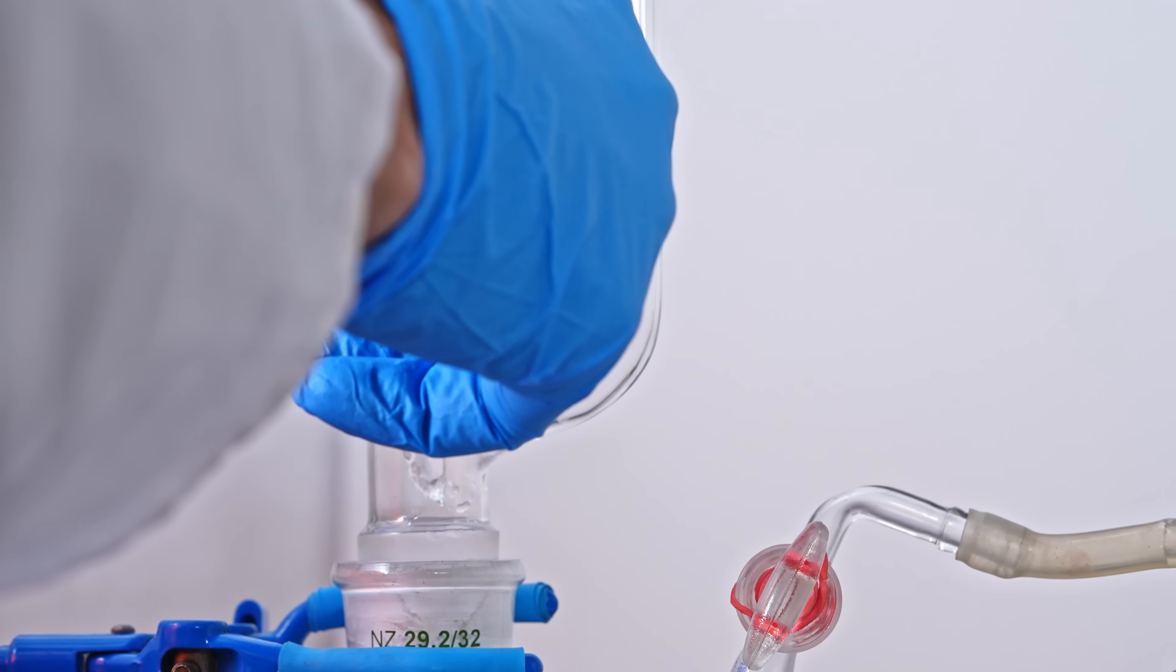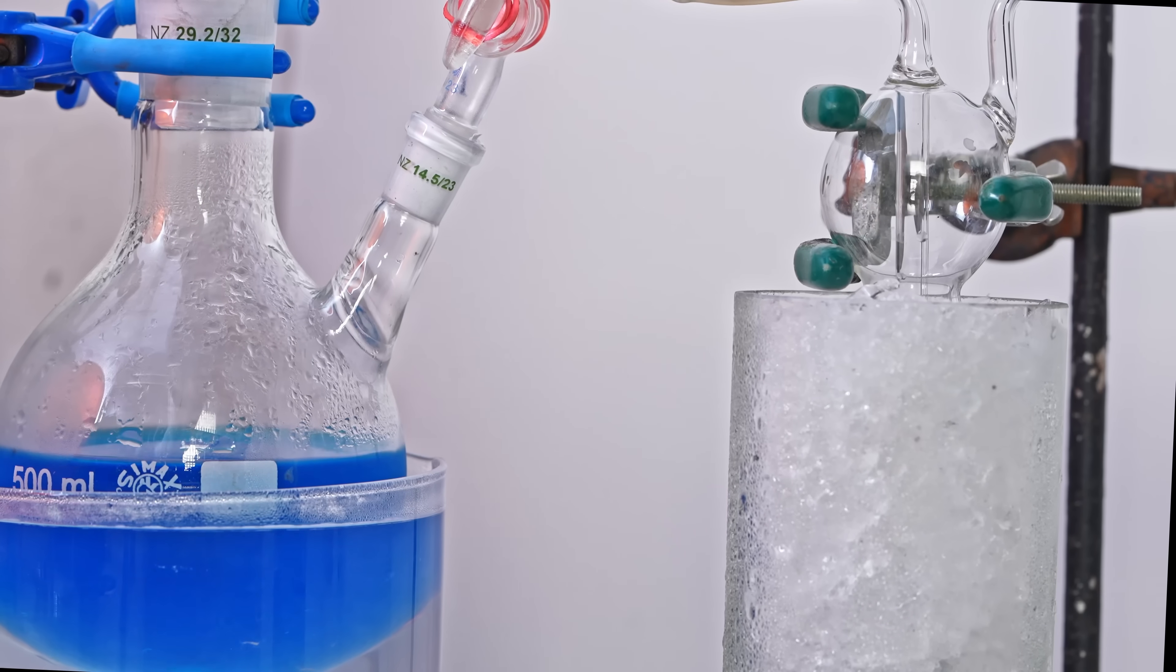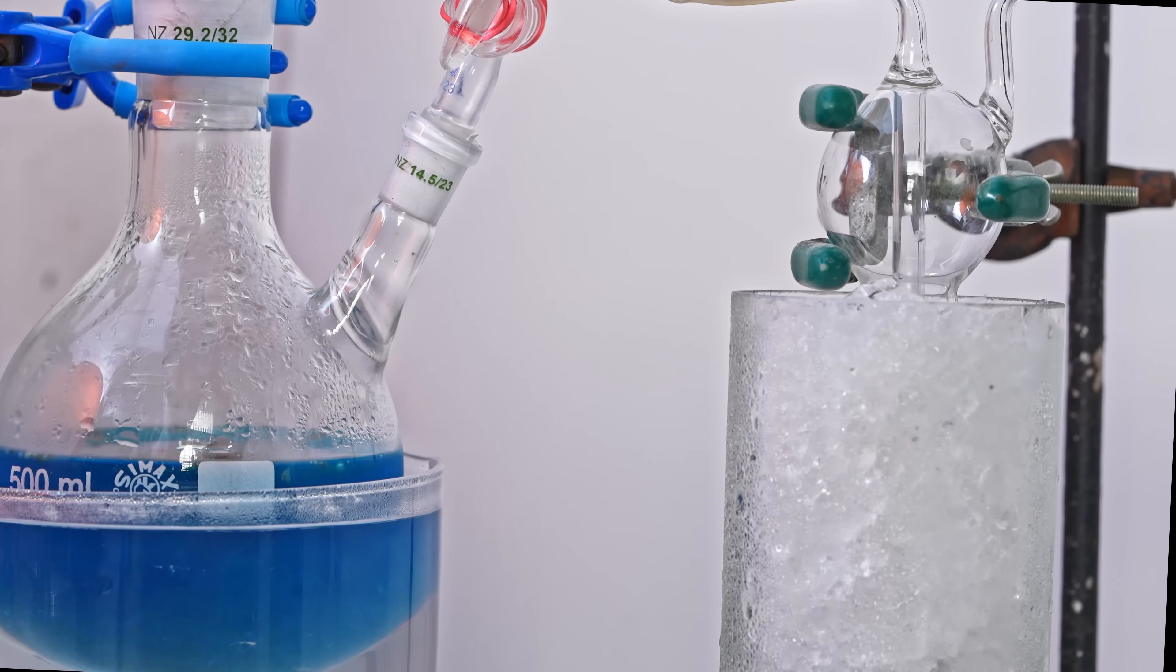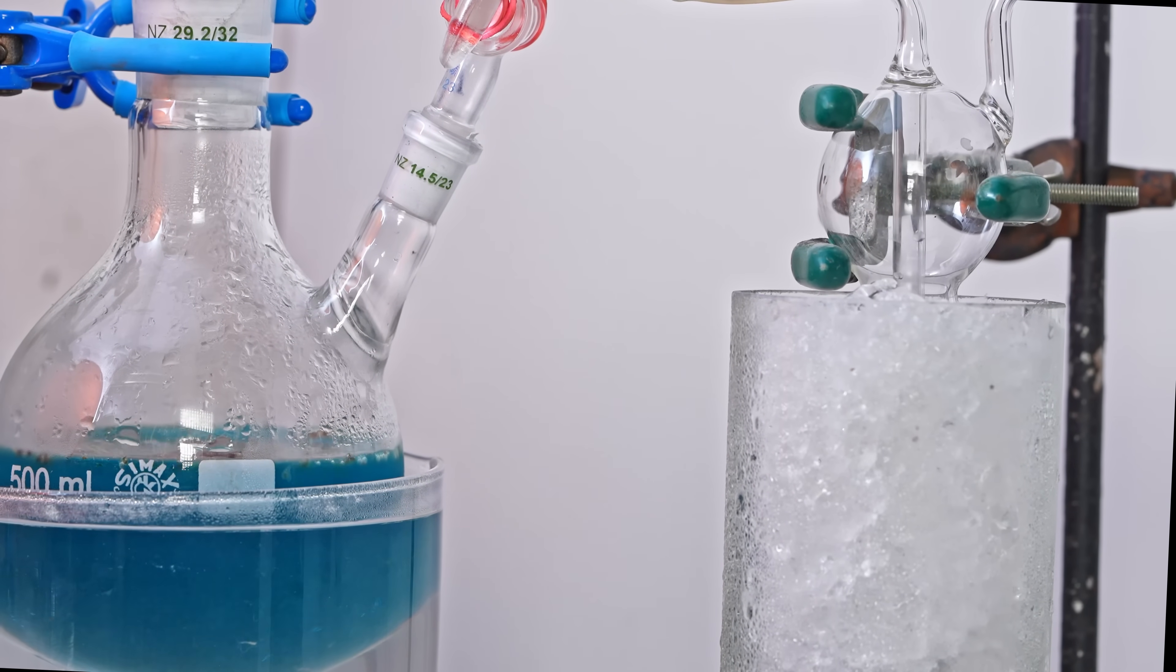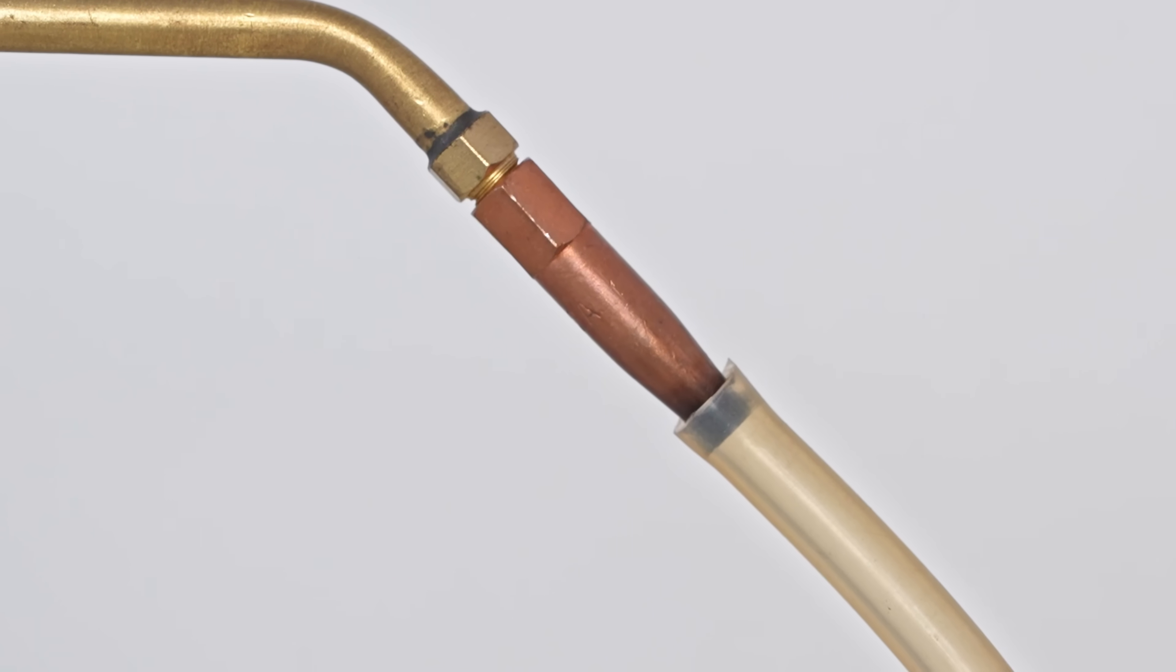So, let's start the synthesis. I again add the potassium cyanide solution to the copper sulfate solution and get a very, very good intensity of cyanogen release. Let's ignite it now.